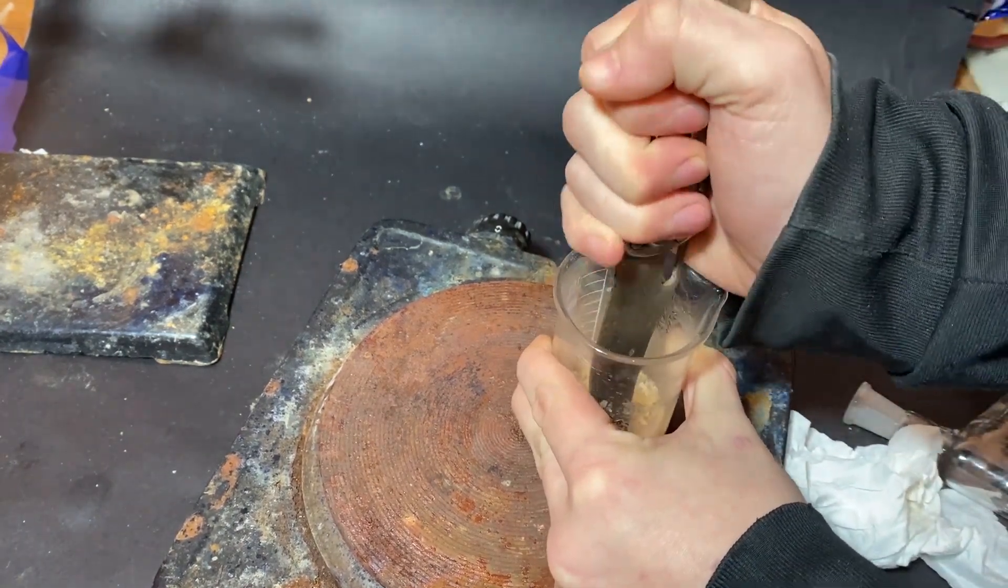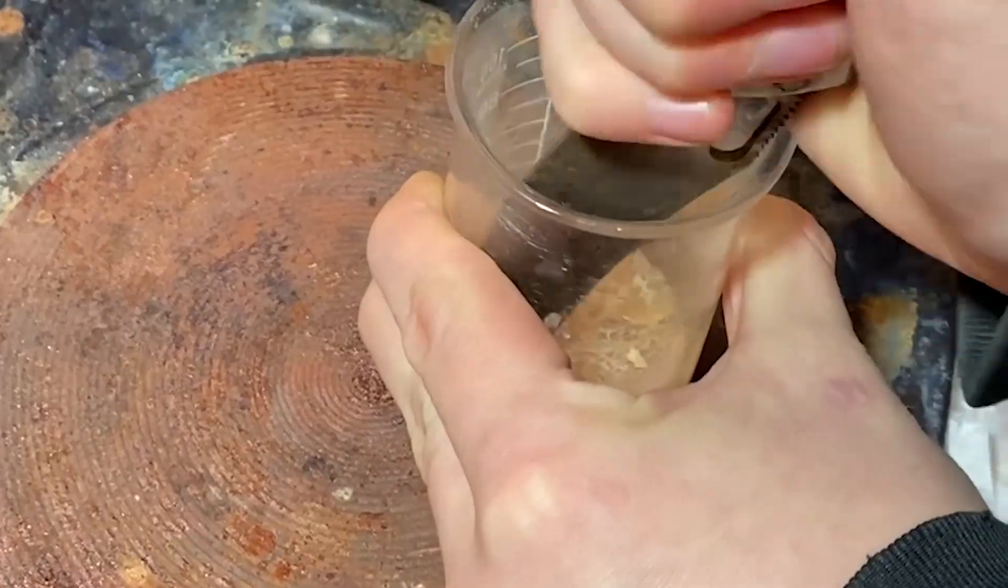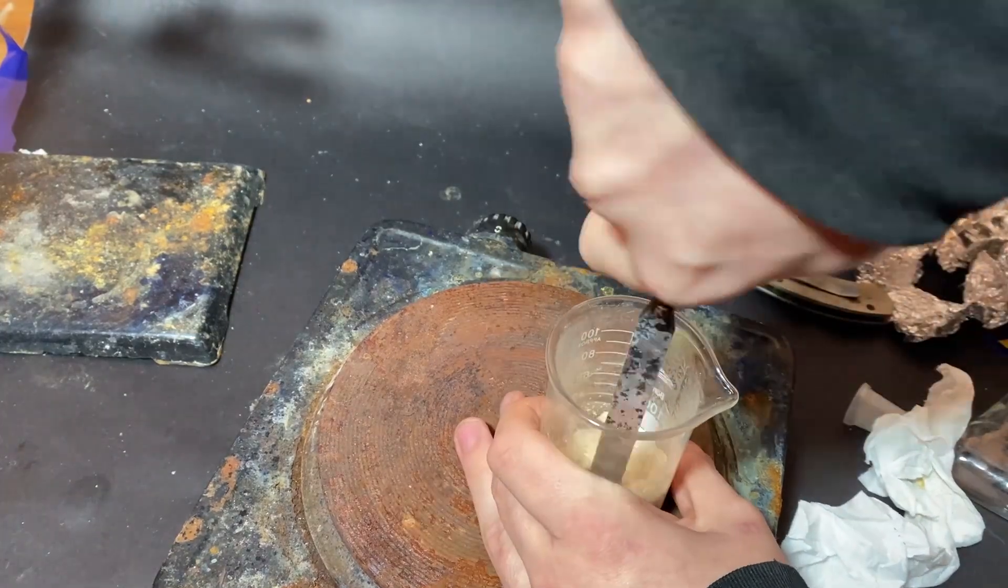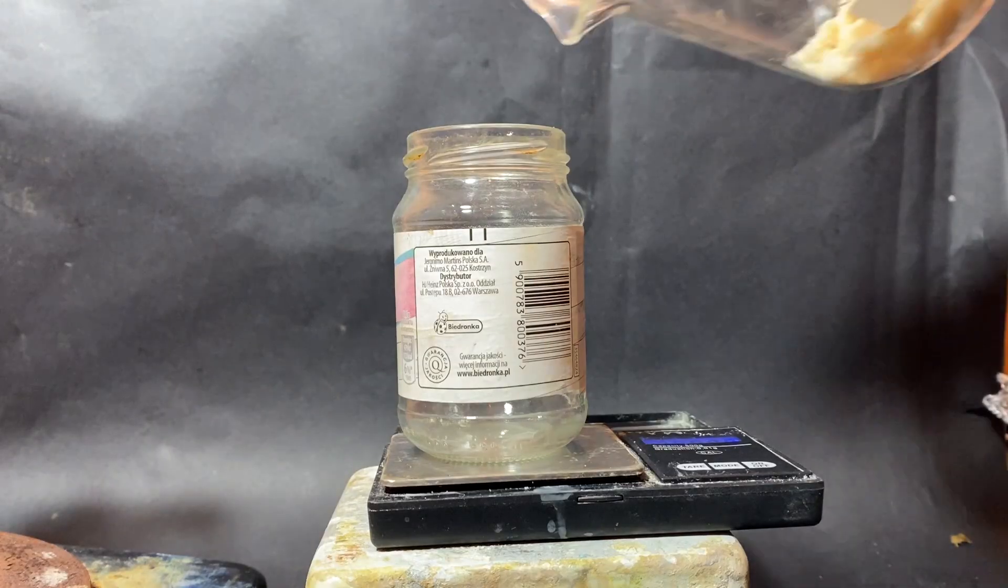I've tried to break it up, but it was extremely hard and tough. And because of that, I've eventually had to bring out a literal chisel. Eventually the whole thing gave way and I weighed everything out.